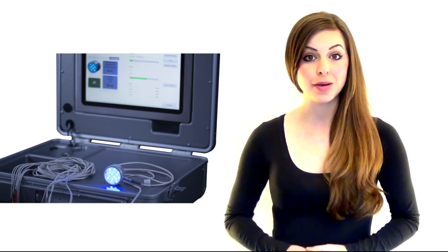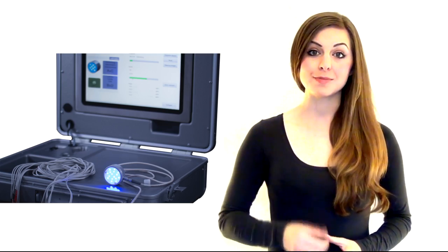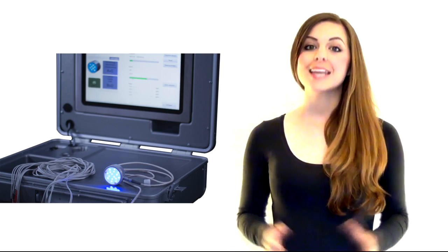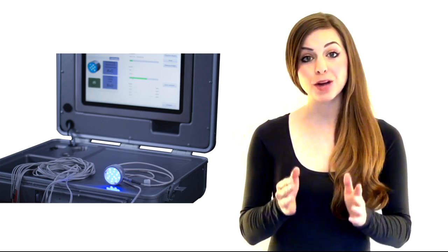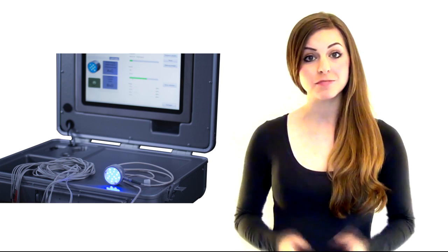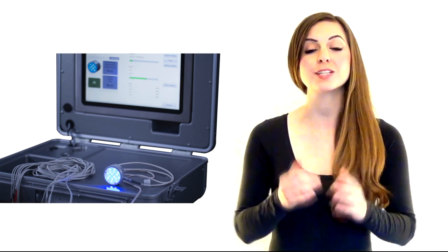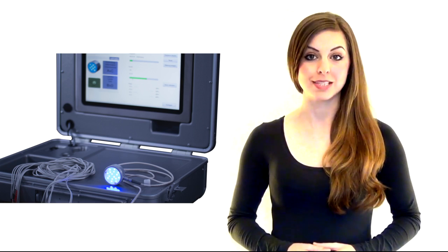Featuring new hardware and even greater performance, the device has been tailored to meet the primary requirements of providers of professional sports treatment.